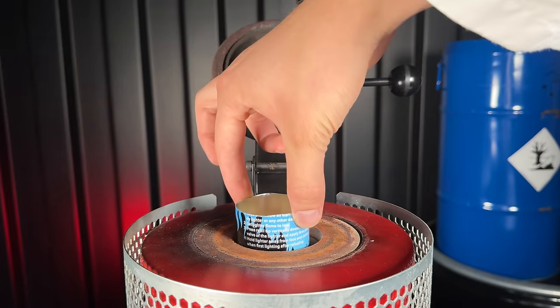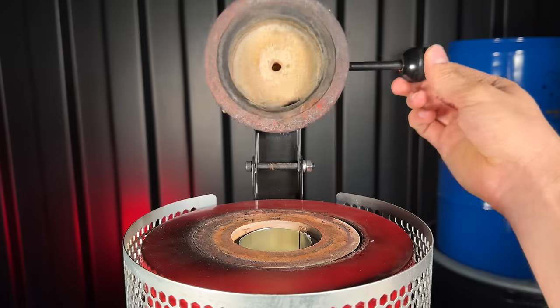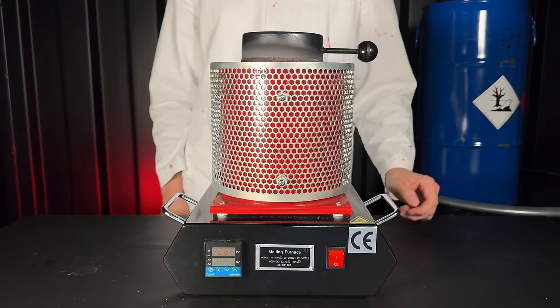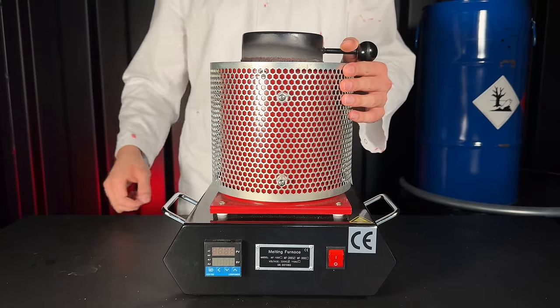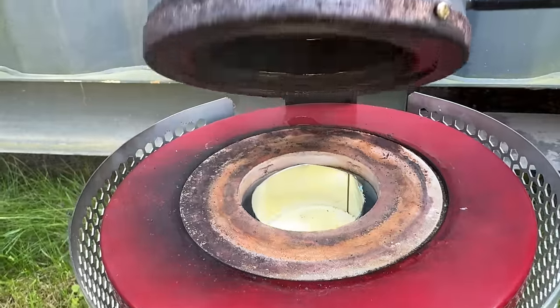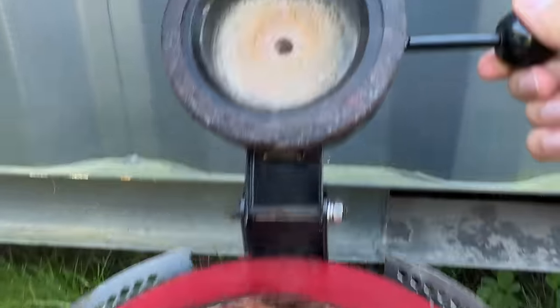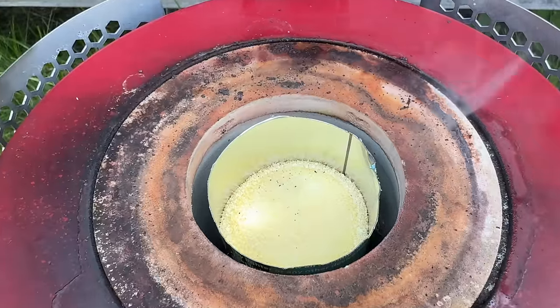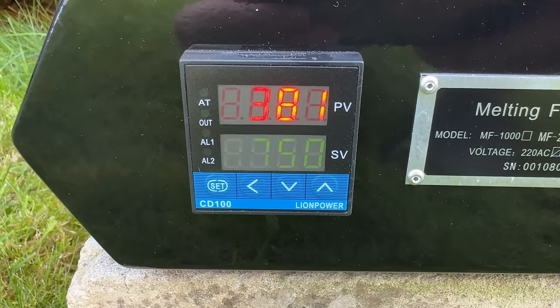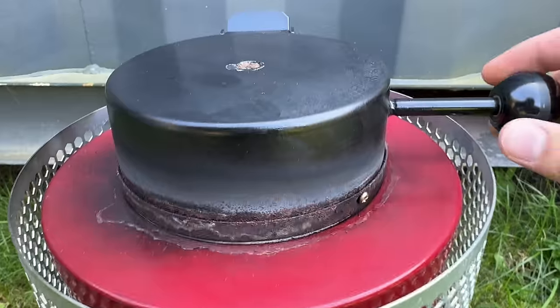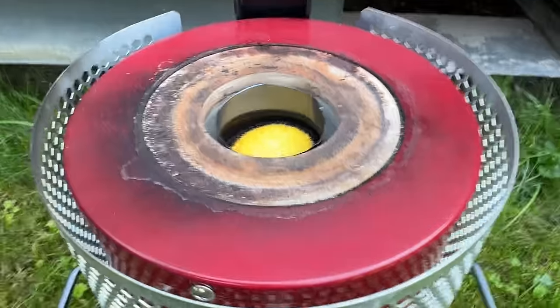The reagents may be cheap, but for this reaction I absolutely need to use an electric furnace, which is not cheap. Despite having excellent ventilation, I am not going to run this reaction inside but will take it outside. I set the furnace to 300 degrees Celsius at first because we need to get rid of the water.